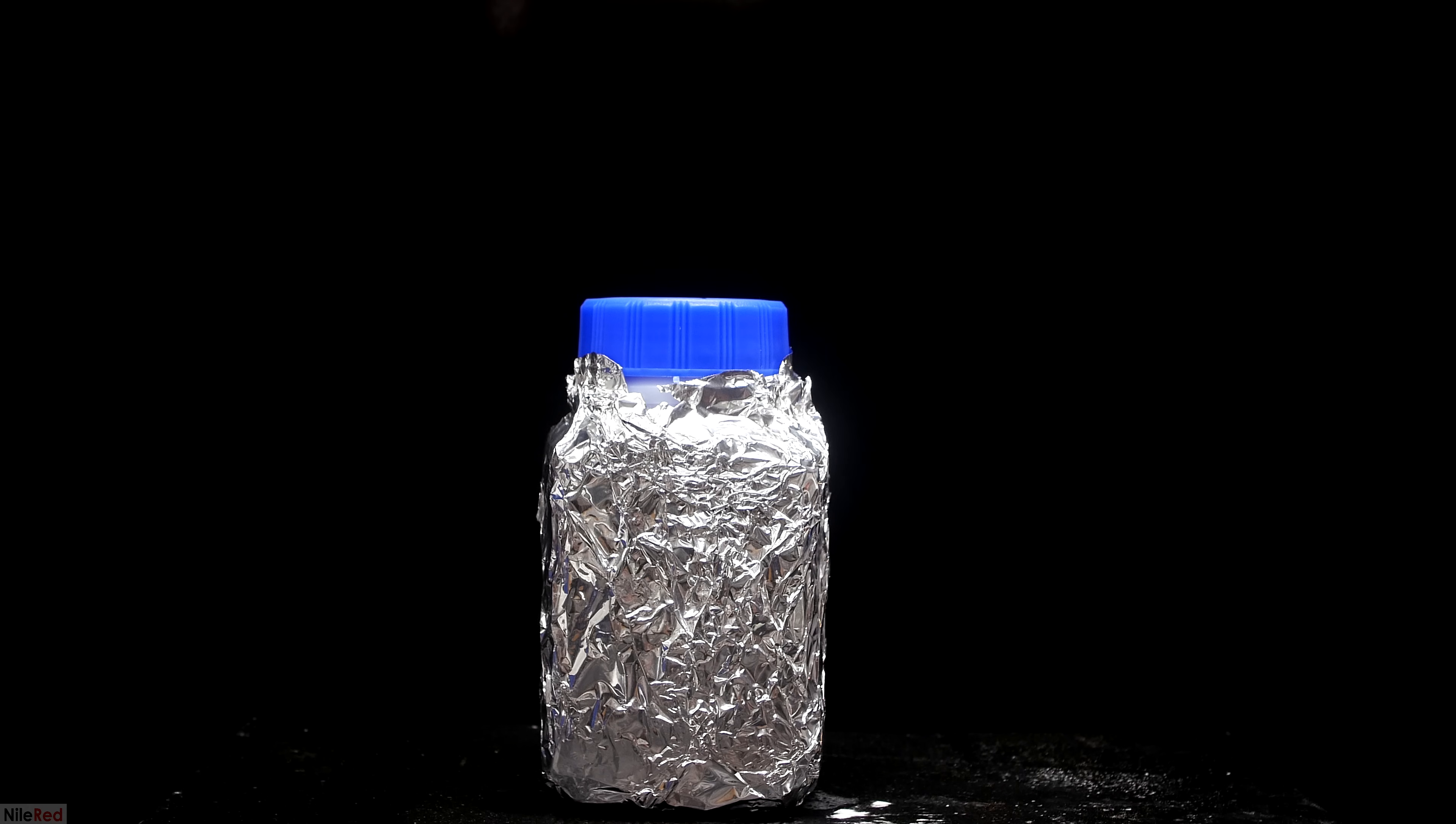Anyway, now that I have 96 grams of silver nitrate, this is much more than I need. Like I said before, I want to use it to do the silver mirror experiment and to make the water sensitive explosive with magnesium, but I'm not exactly sure when I'm going to do this.